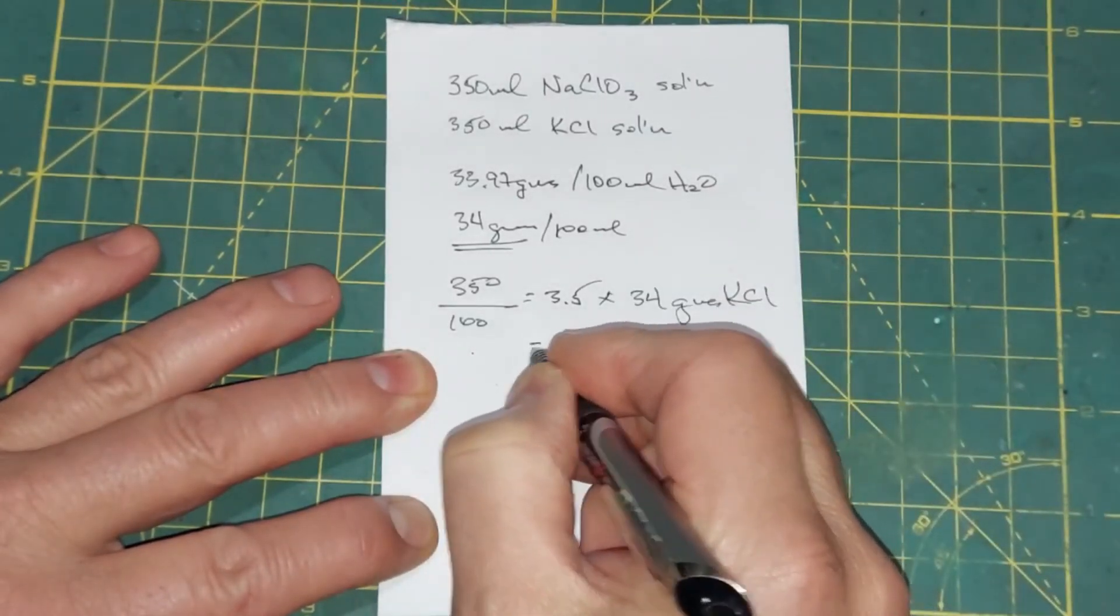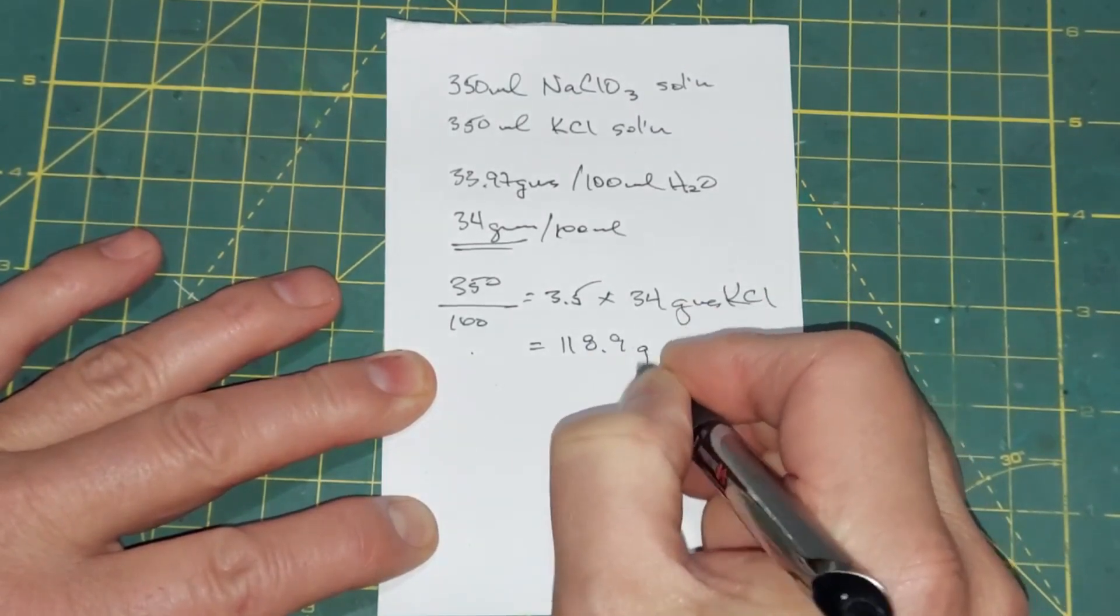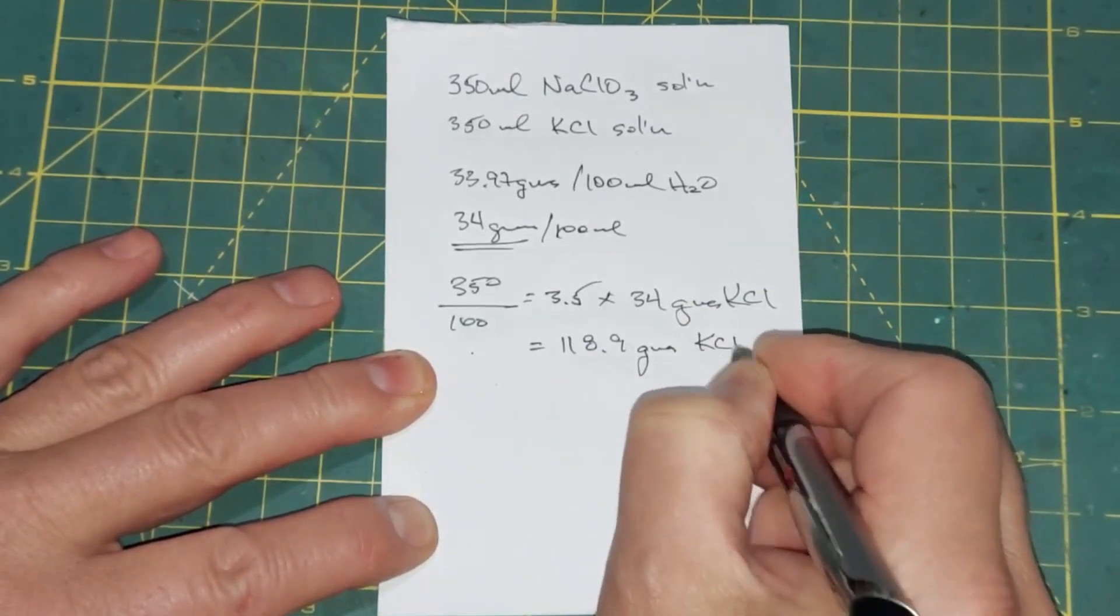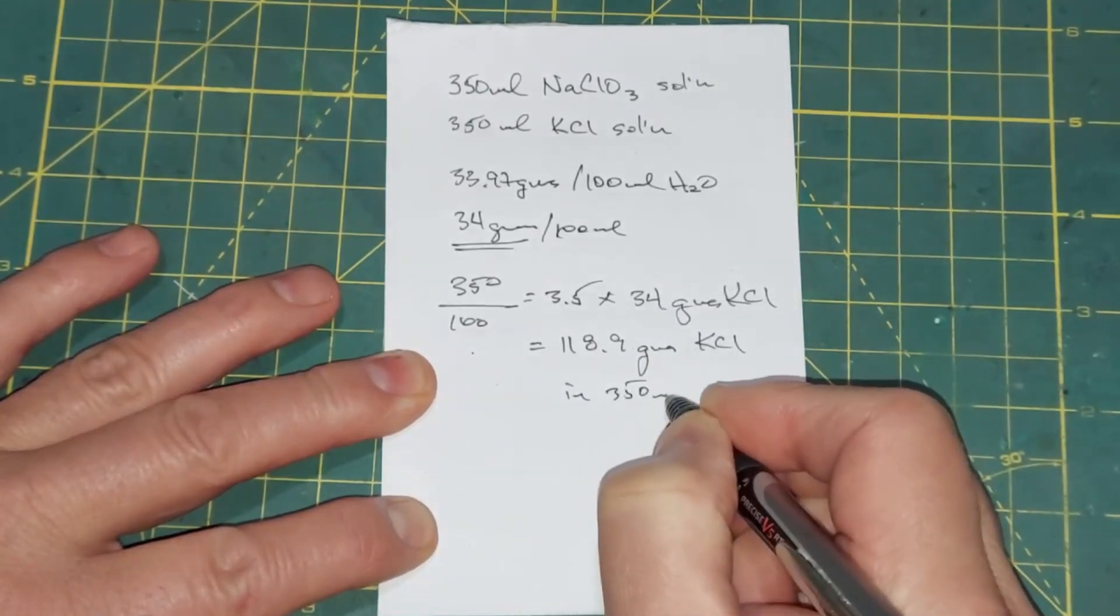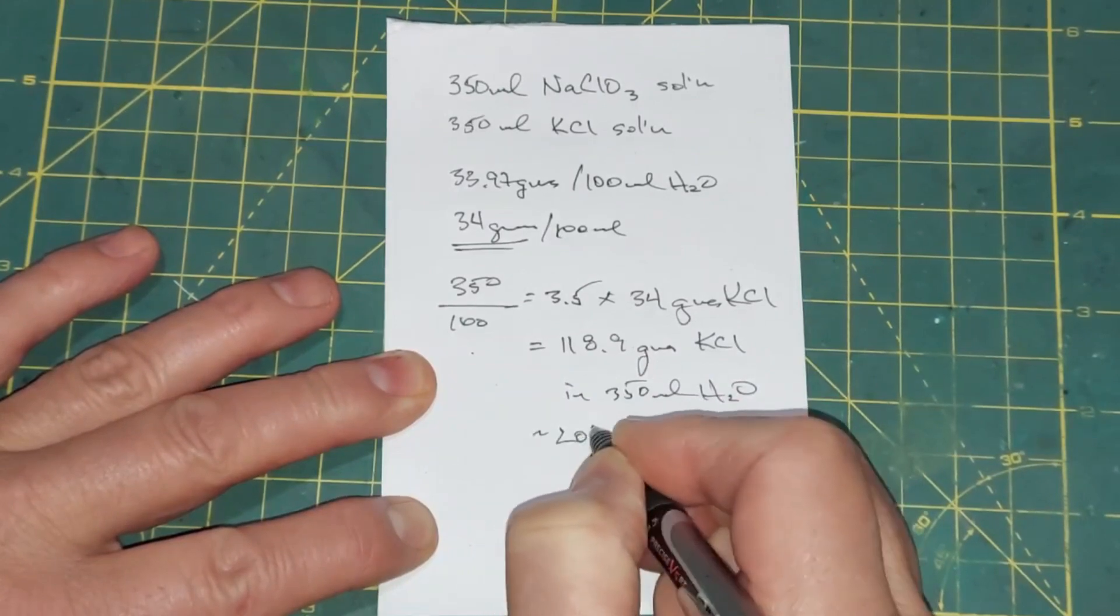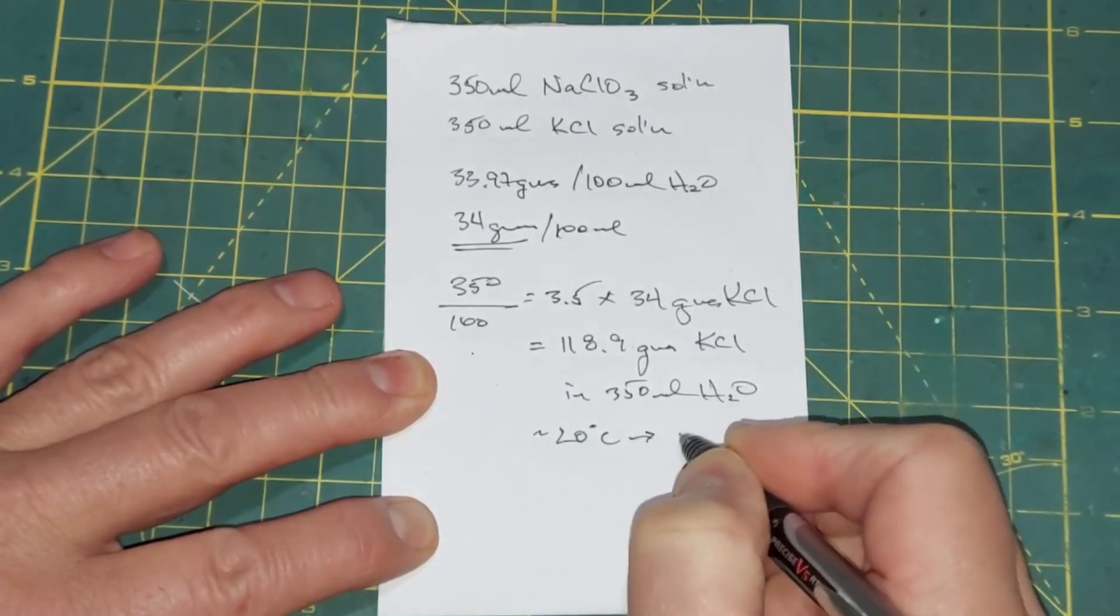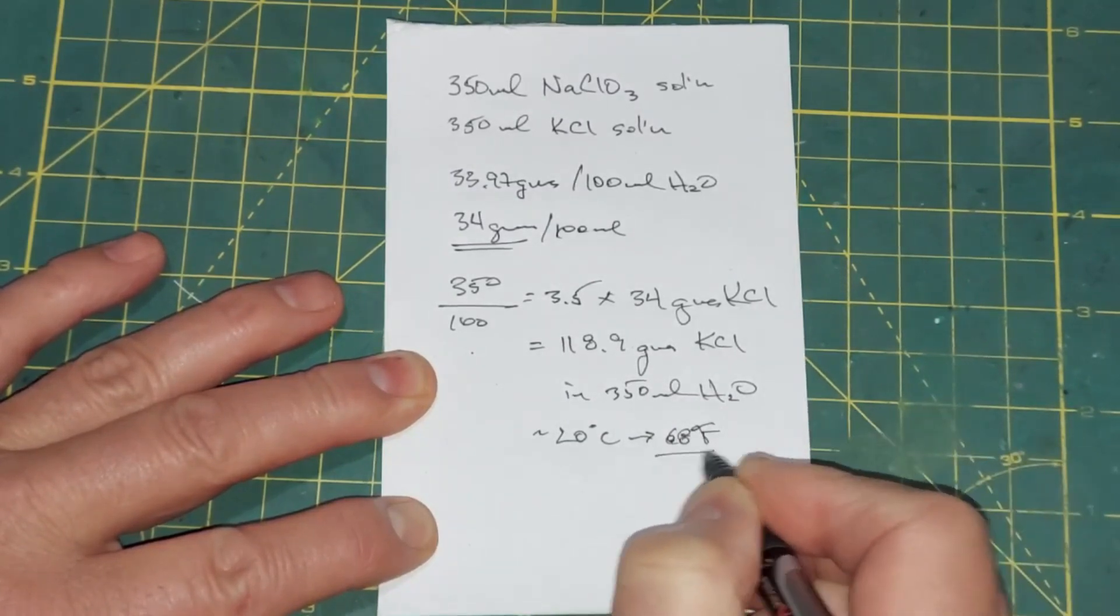And that leads us to a total of 118.9 grams of KCl, and that'll be in 350 milliliters of water. And this is at 20 degrees celsius, which is 68 degrees fahrenheit. And so that's the temperature of the water I'll be using.